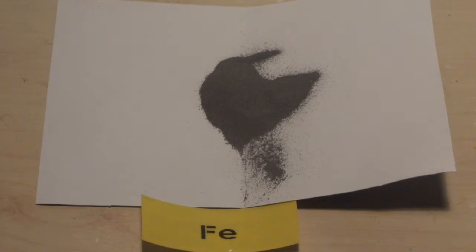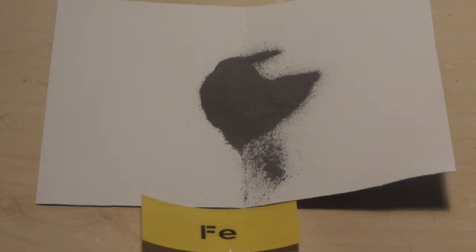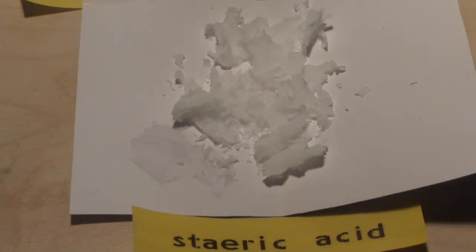To protect the metals from premature oxidation, rusting and local cell formation, we need a few cubic centimeters of hexane or toluene and some stearic acid. And last but not least, some degreased iron rods and straws.